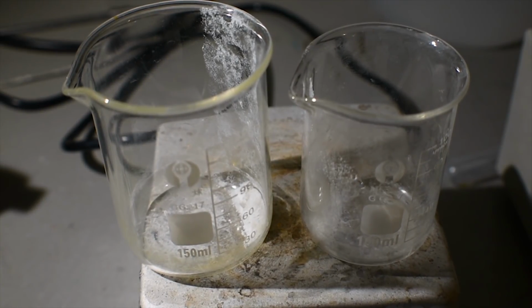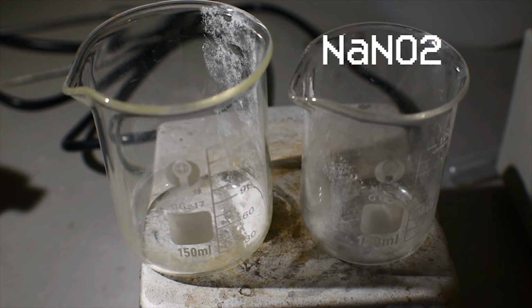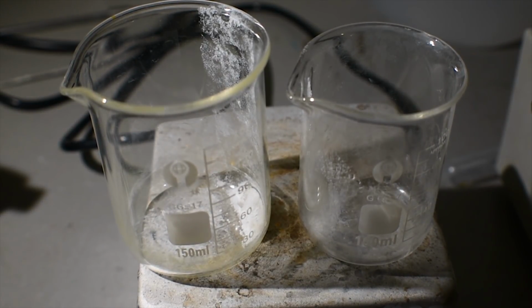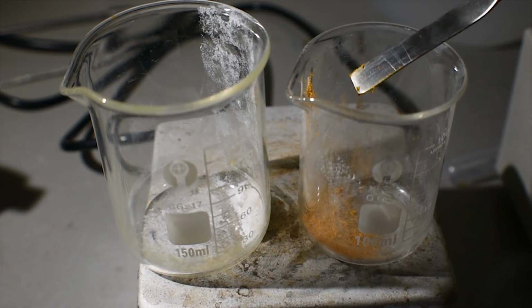Here I have two oxidizers. On the right is sodium nitrite, and on the left is potassium perchlorate. I'm going to mix the perthiocyanogen with them separately, and then put them side by side to see how well they burn, if at all. Oh, that's weird.